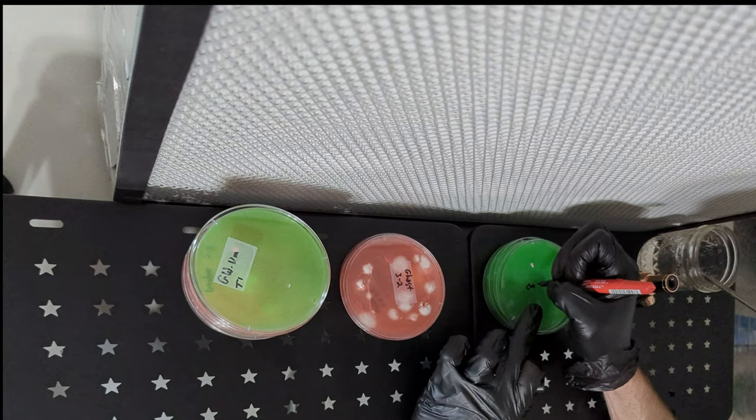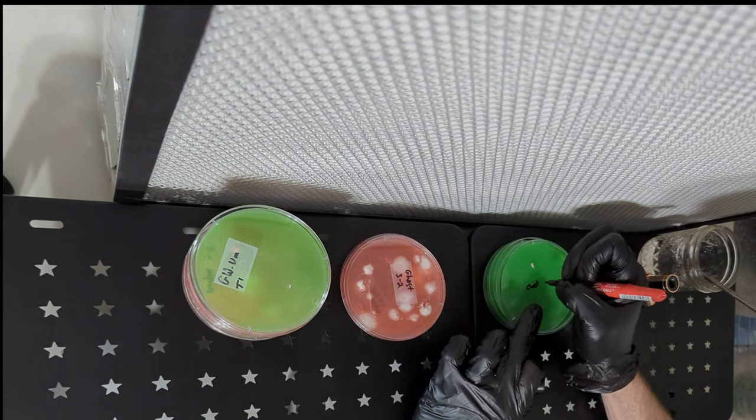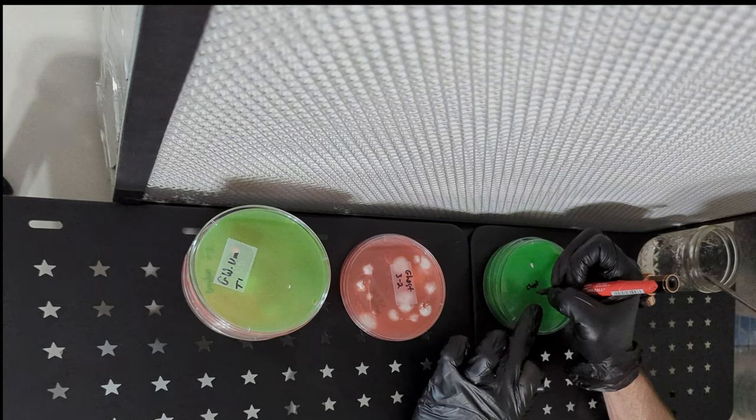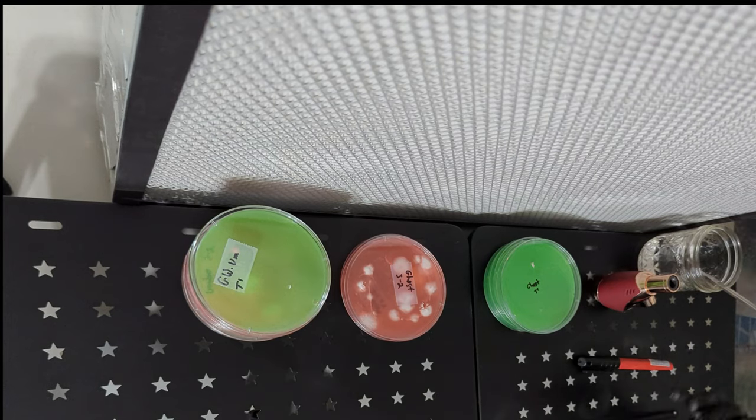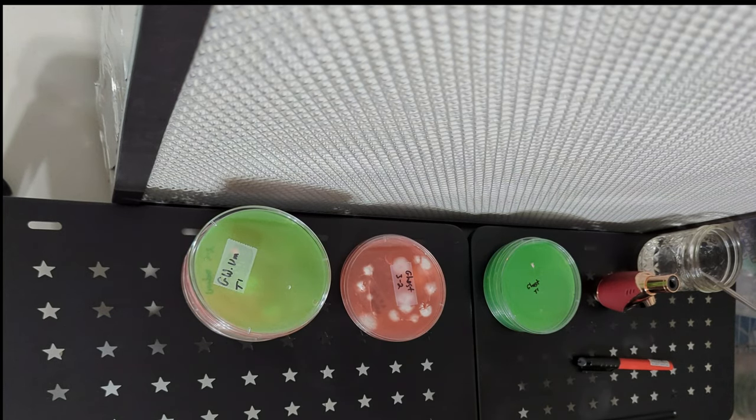With a still air box, the air is typically still, so anything that falls off your hands or tools will fall straight down into the plate. Almost anything that falls into the plate will grow. That's why it's so important to perform procedures with precise accuracy. Don't mess around and keep plates uncovered for too long.